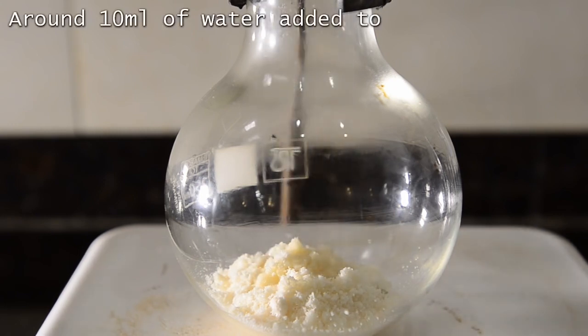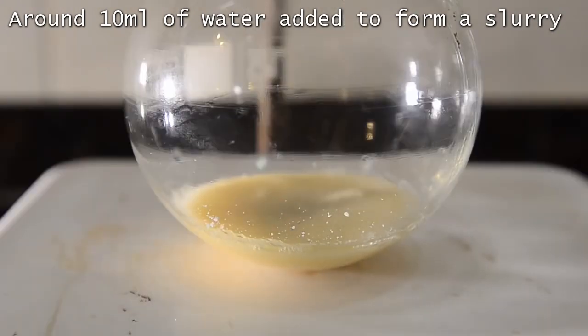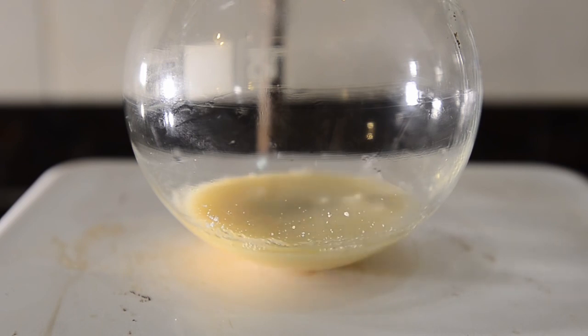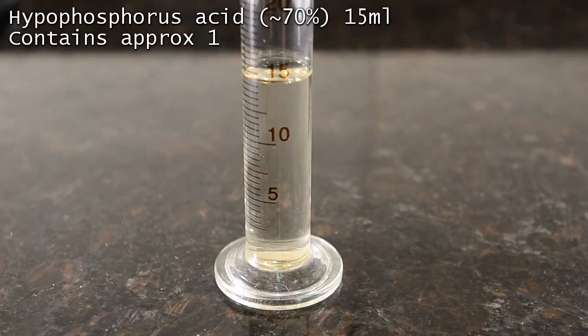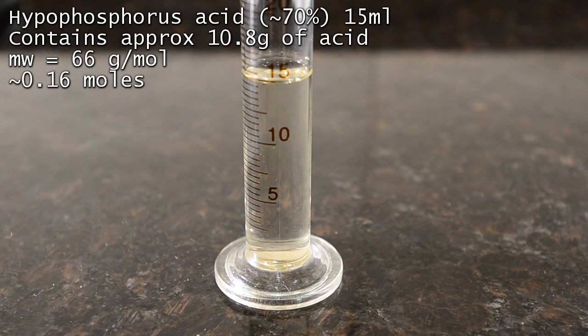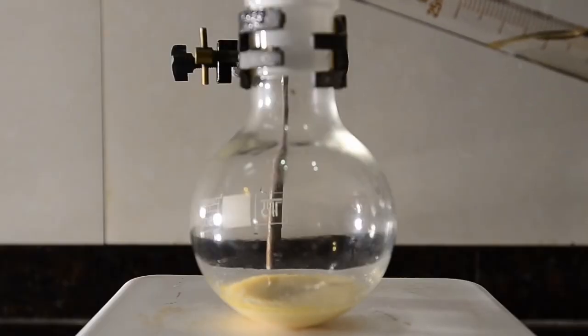Not all the acid dissolved. Here's our slurry. Our idea was not to add too much water at this point so as to dilute our hypophosphorous acid too much. Now we measured out 15 ml of our approximately 70% hypophosphorous acid solution that we prepared in the previous video. This is a large molar excess to the mandelic acid in order to speed up the reaction. We added this to the flask.